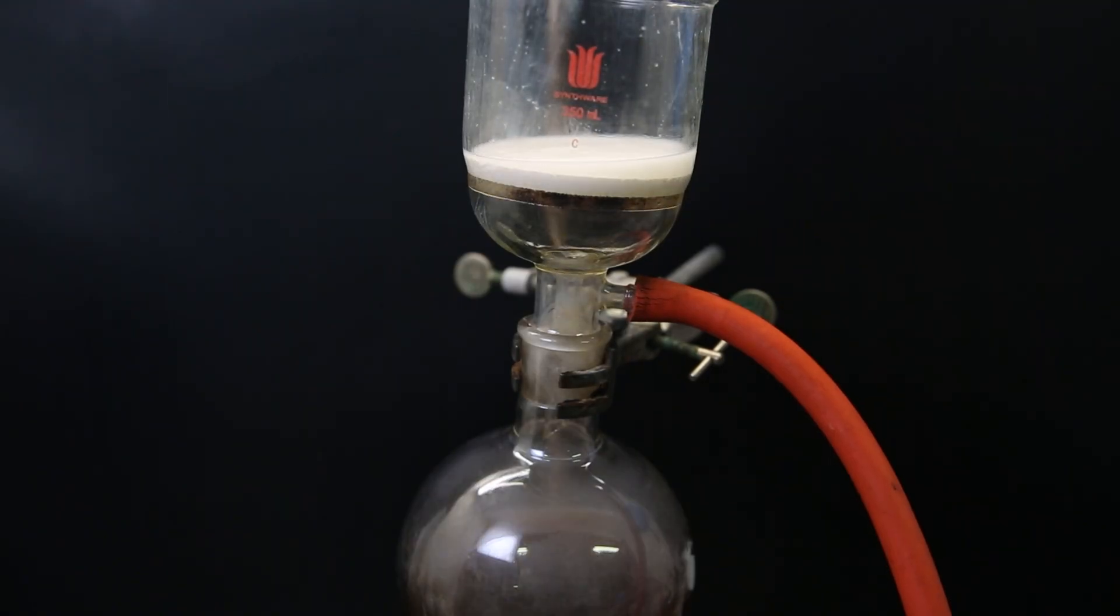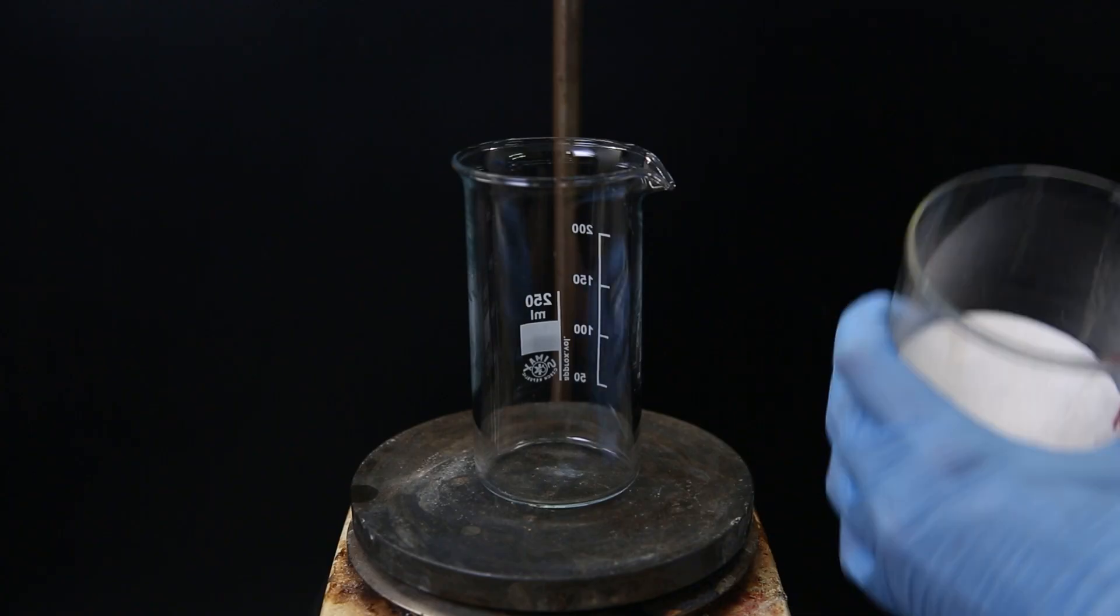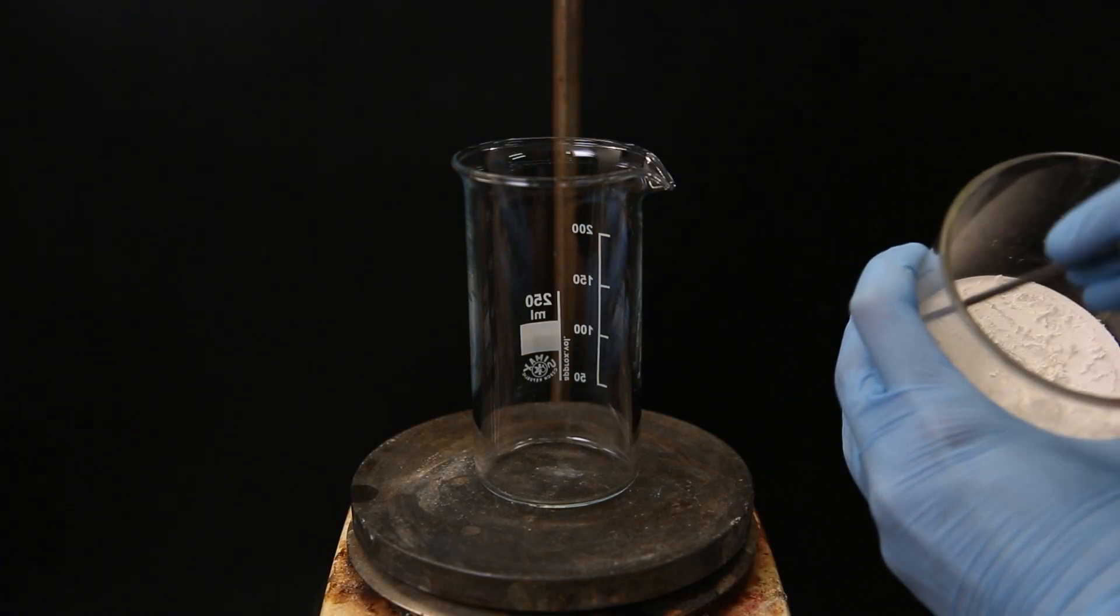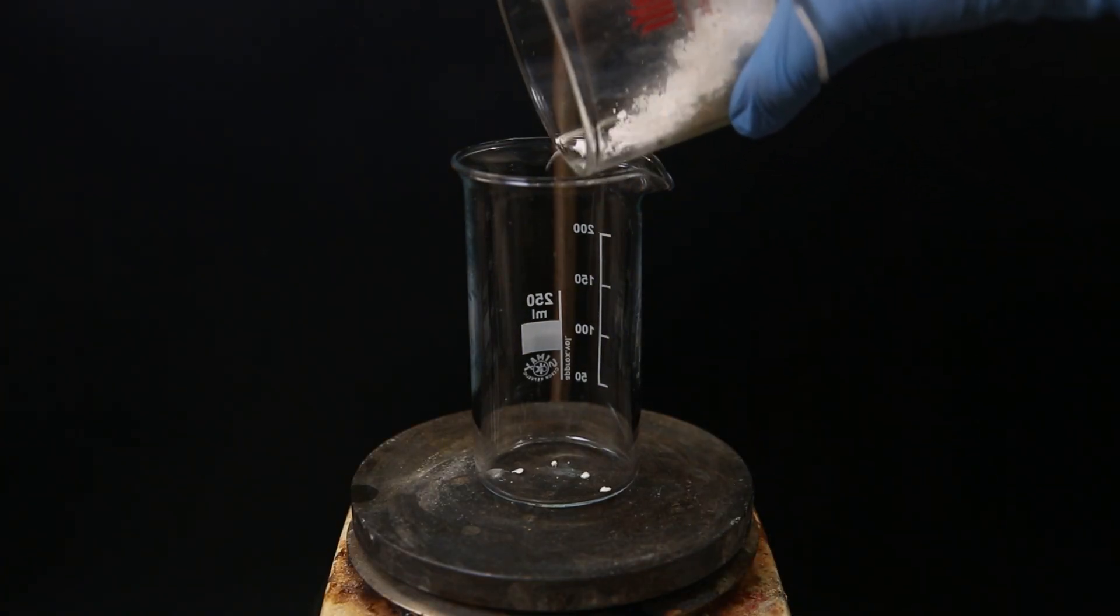So I set it up for vacuum filtration, leaving behind a white solid that I wash with more DCM. The liquid filtrate still contains product, from which I can recover most. But first I take the product and move it into a beaker, giving the first bit of relatively pure product.